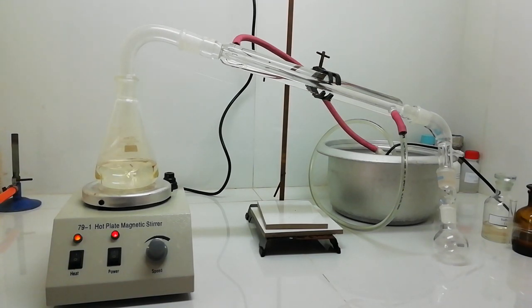Now I am going to cover this whole setup with aluminum foil. Let's see when we get the product.